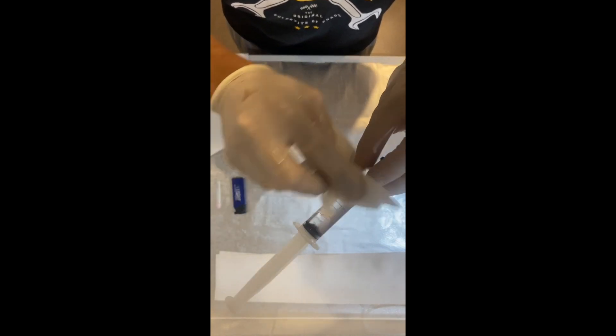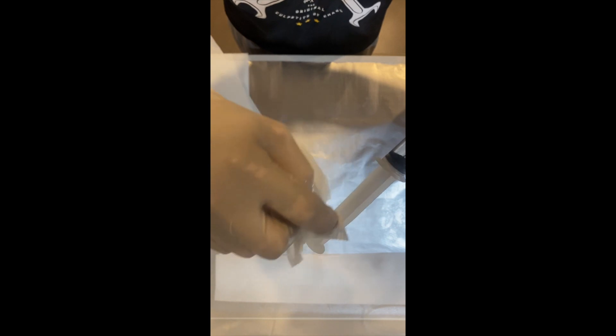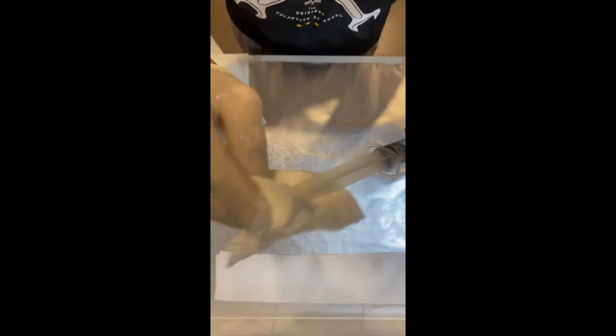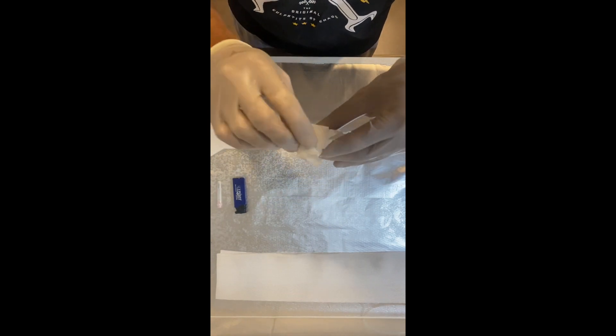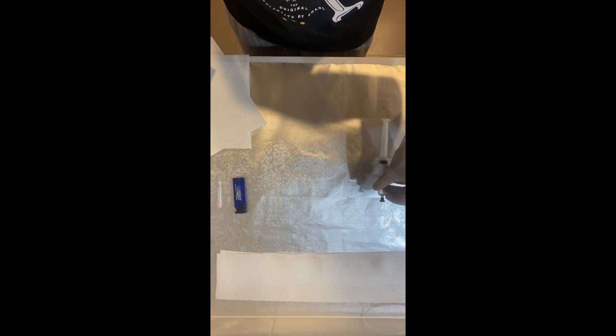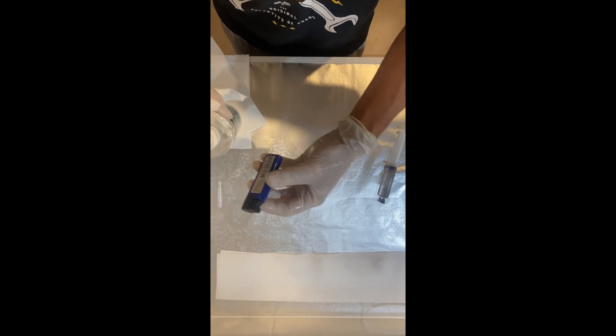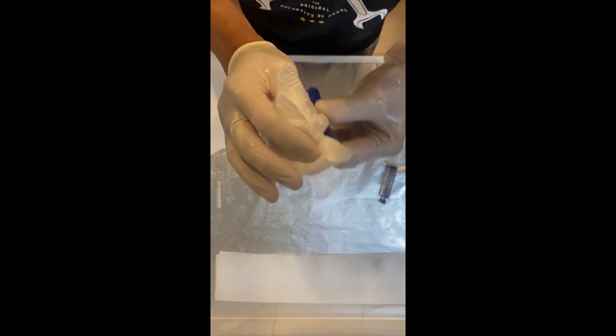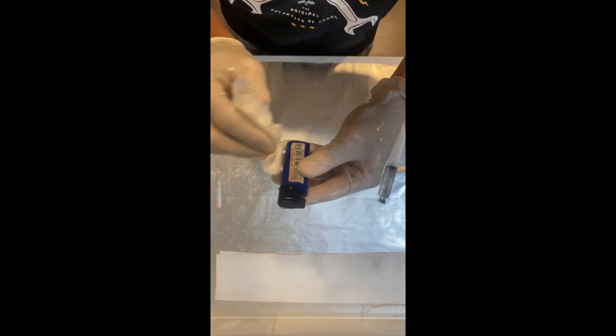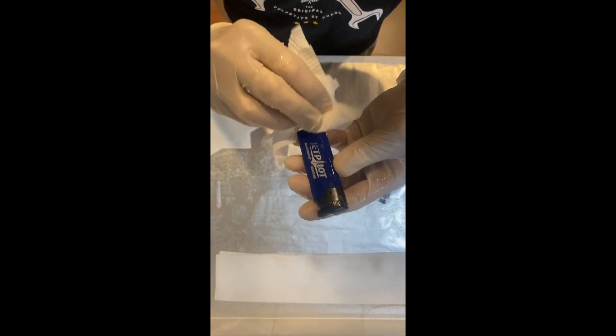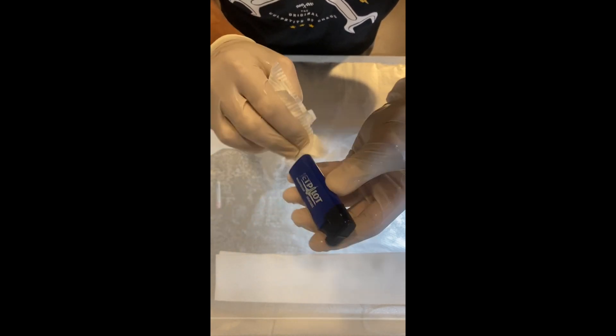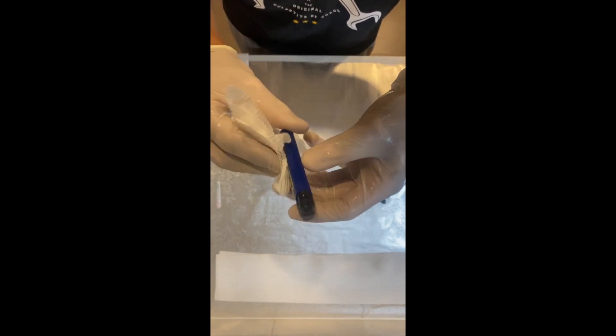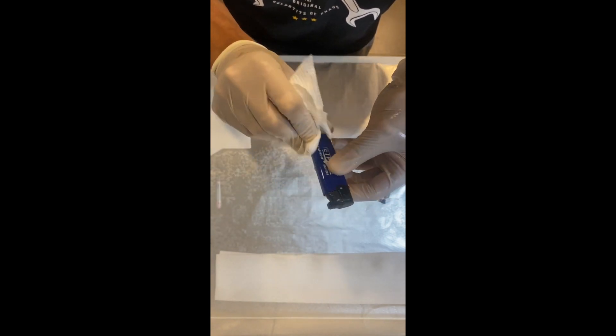Just wipe it down just like we did in the other video. Get all the way in there. Everything is going to get alcohol as usual. We want to keep this as sterile as possible. Ideally wear a face mask and try not to talk, cough, sneeze, anything like that over this. This is a crucial part in our little process here.